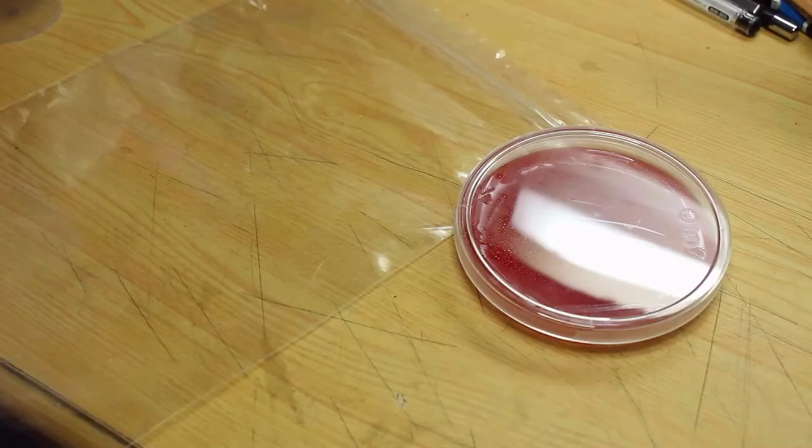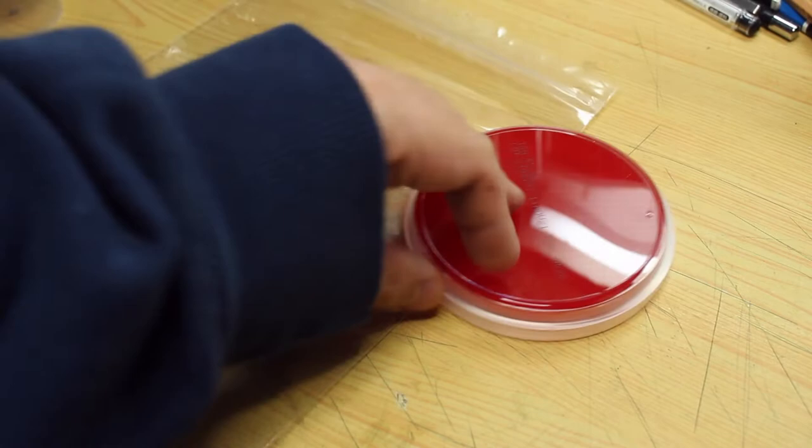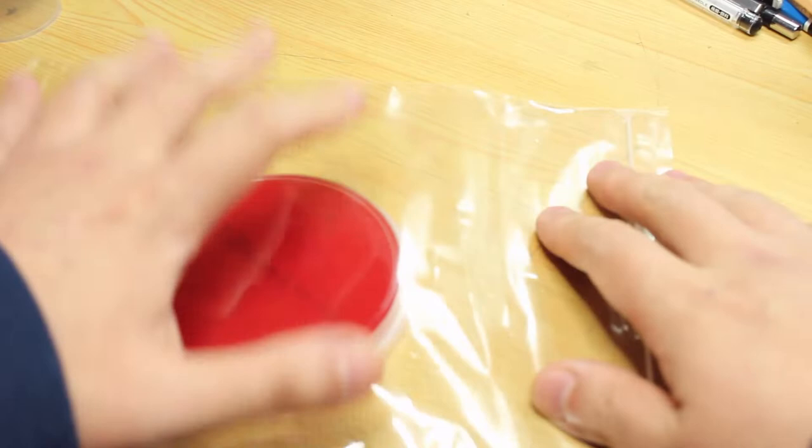Now I've flipped the plate and put it in a bag and leave it in a warm place for it to grow, a process we normally call incubation. This will take a few days. If your place is not warm enough, in the video it took three days in which the temperature is around 20 degrees Celsius.